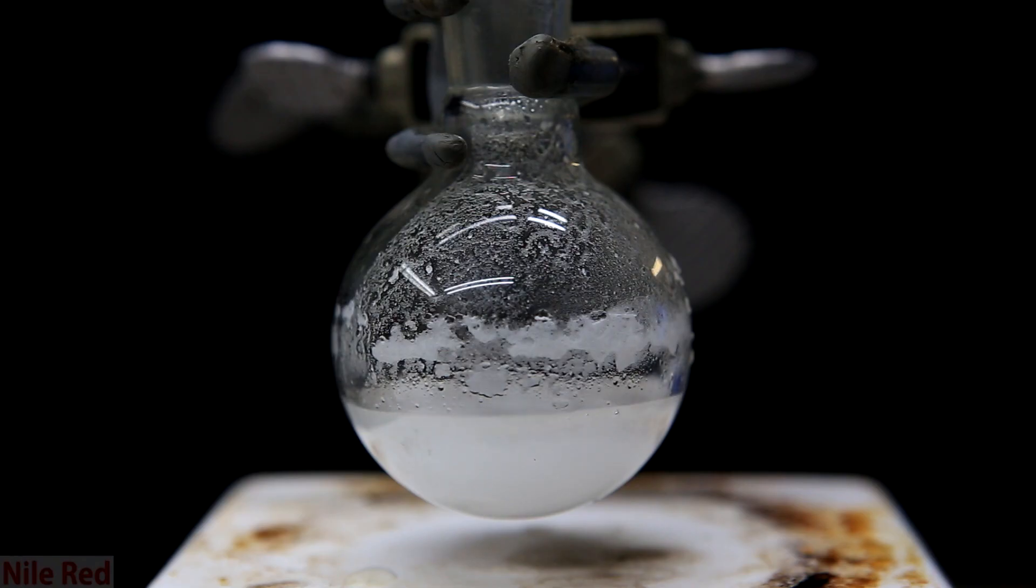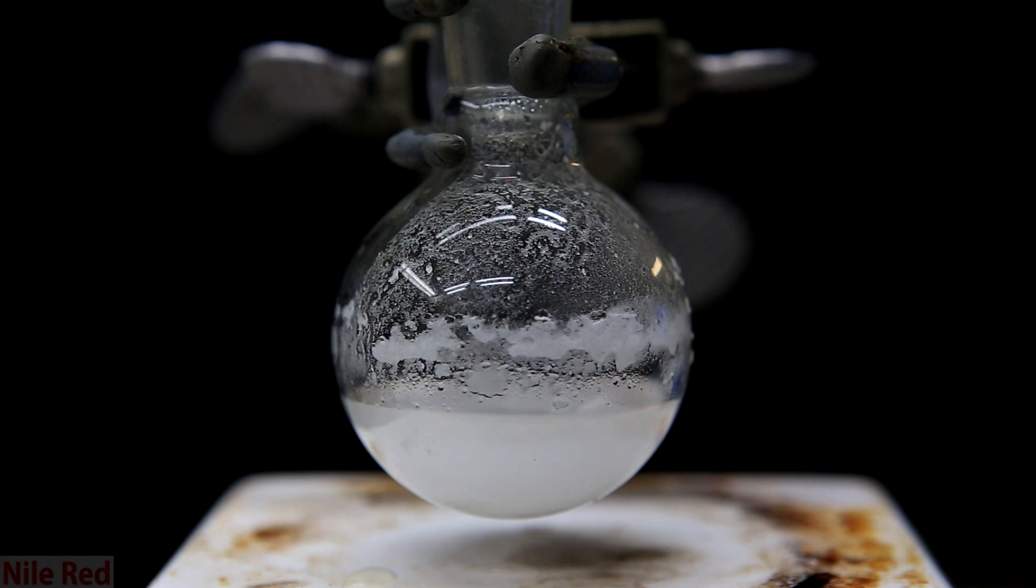After stirring for a little bit you can actually see a little bit of a layer forming on top. This is actually our desired product which is not miscible with water.